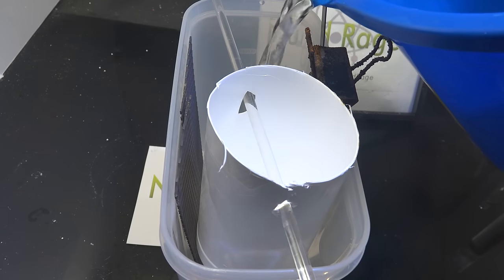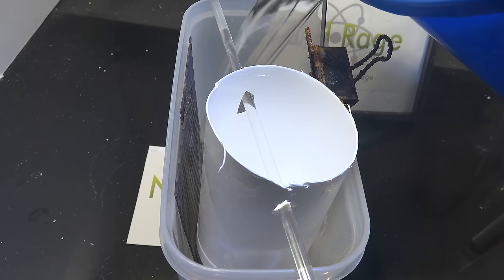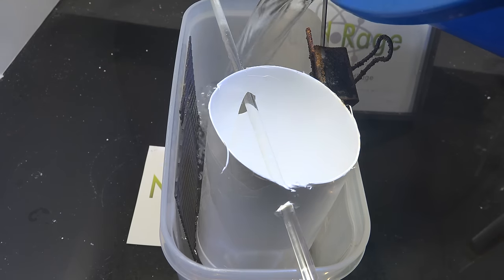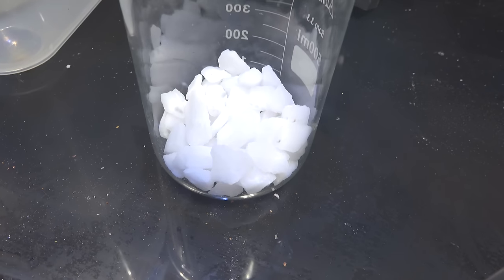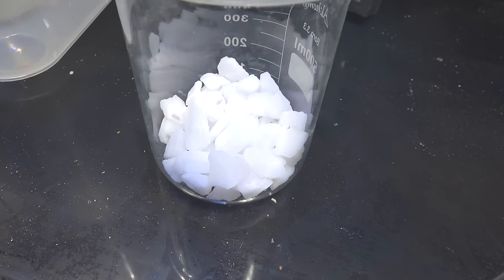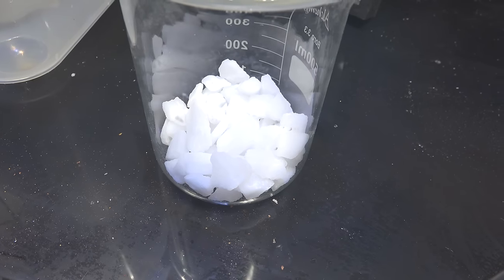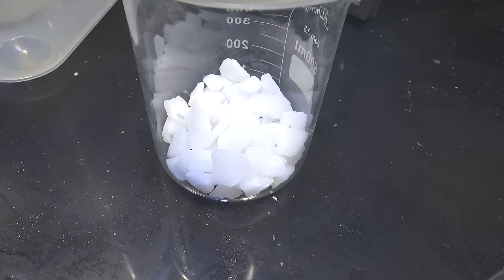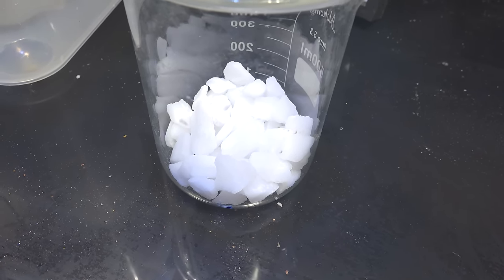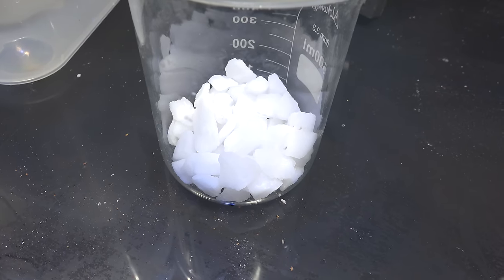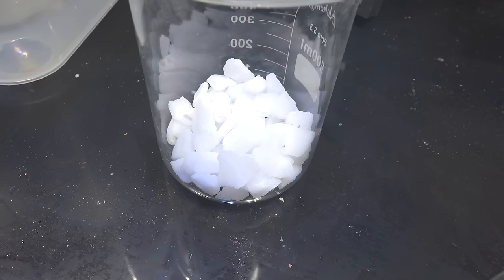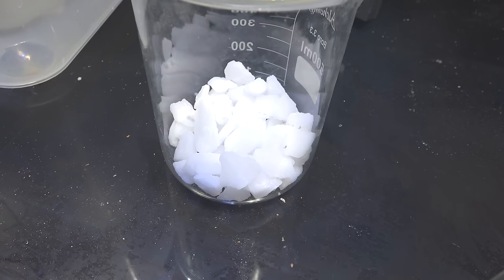Now we fill the cell with a saturated solution of potassium chloride. Potassium chloride can be purchased as a salt substitute for those people with low sodium diets. A very plentiful source is water softener salt. Most water softener salt is sodium chloride but the potassium chloride variety is also available. Check the ingredients to be sure. You can get large quantities very cheaply.